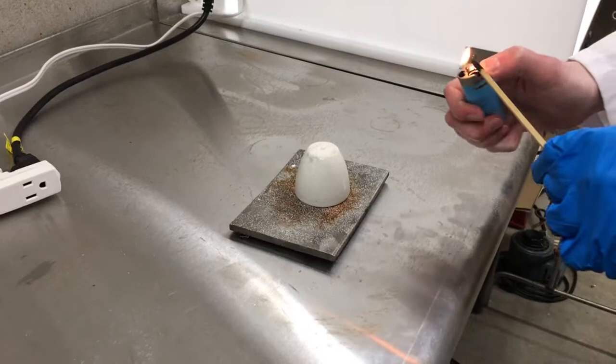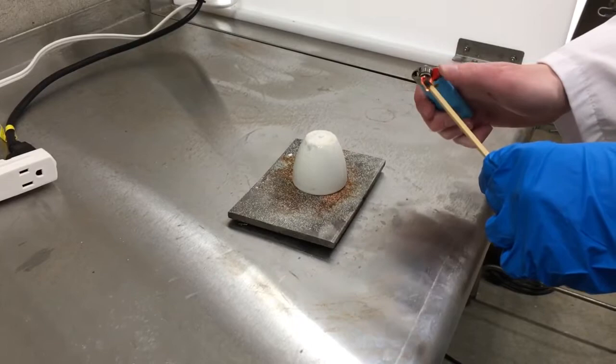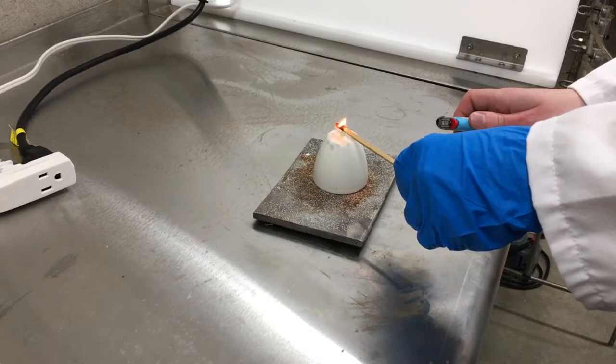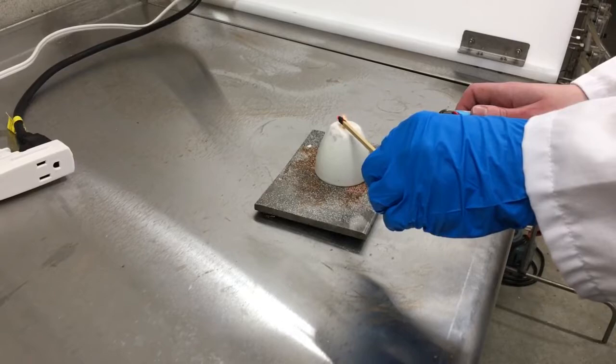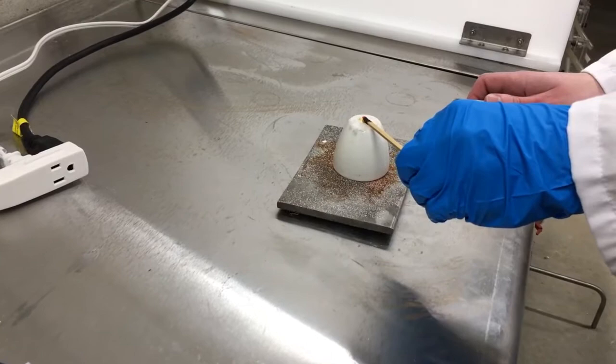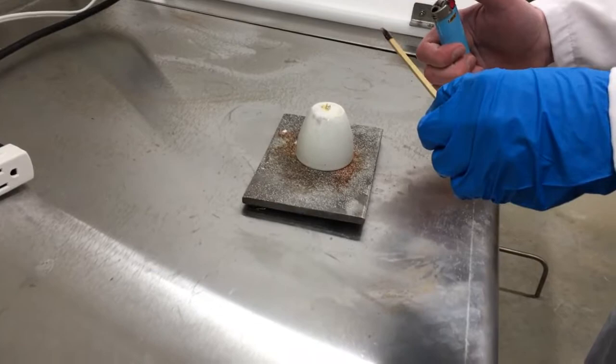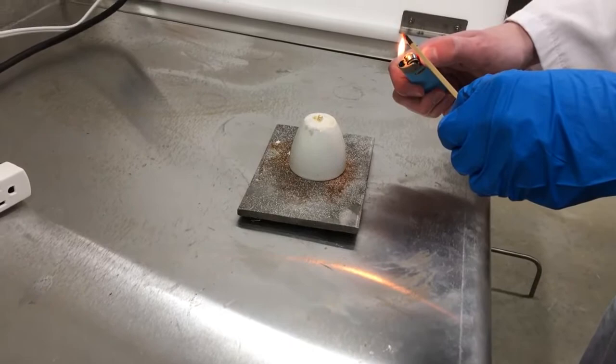It's probably a good idea to say that sodium azide is very poisonous, comparable to cyanides, so make sure you don't get any ingested or on your skin because it will severely harm you if not kill you. Here I was testing the flammability of it. It is still quite wet so I didn't expect it to instantly ignite like you would expect from sodium azide, but you can see that it did ignite and that tells me we got sodium azide.